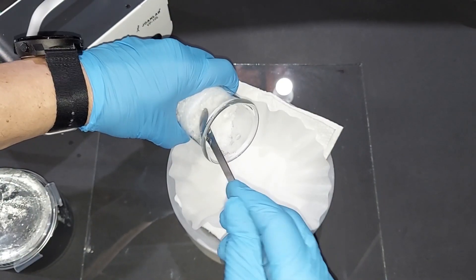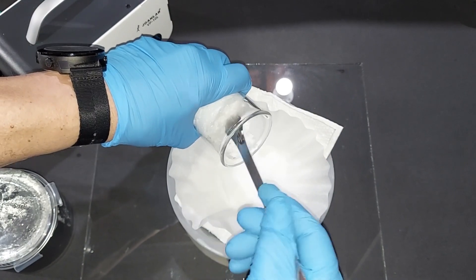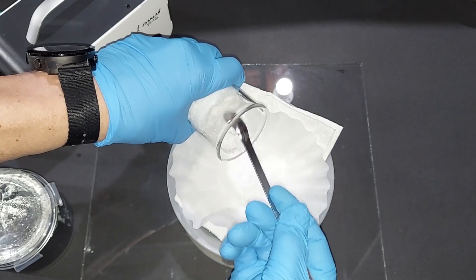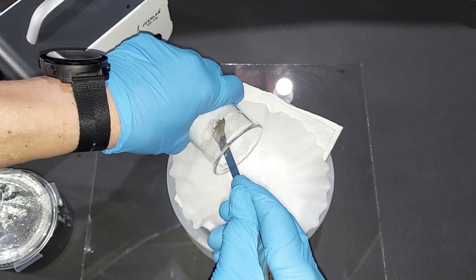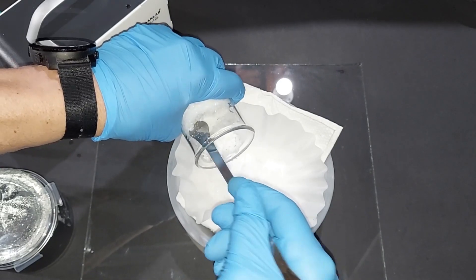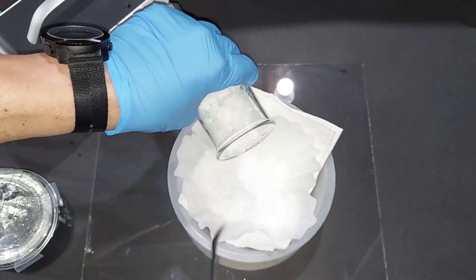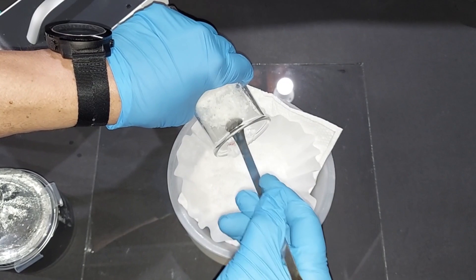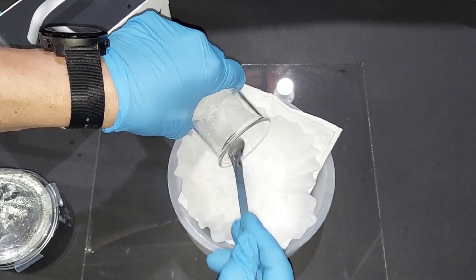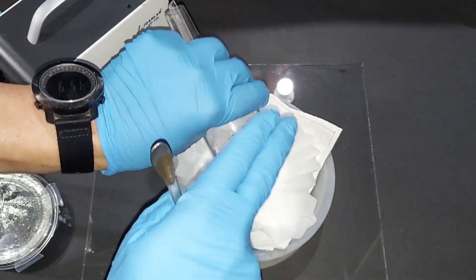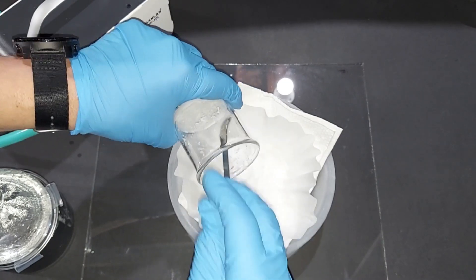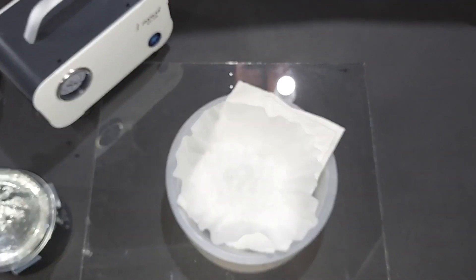Wow, that got seriously packed down. Holy smokes. I did not expect this, so once again, I will be back when this is done here. Just finishing this up. Done. All we have to do now is dry it.